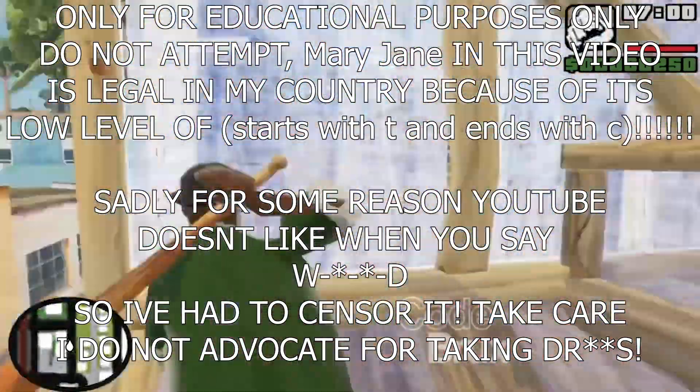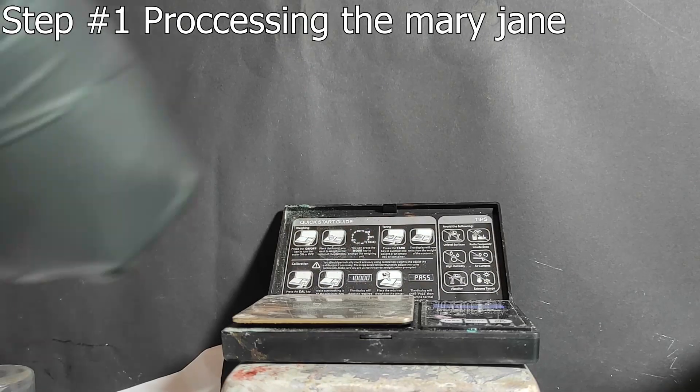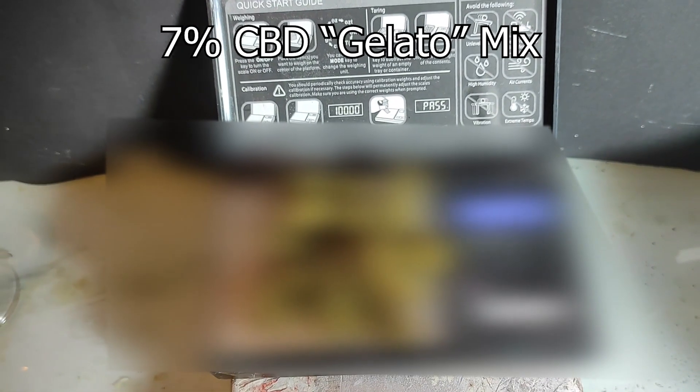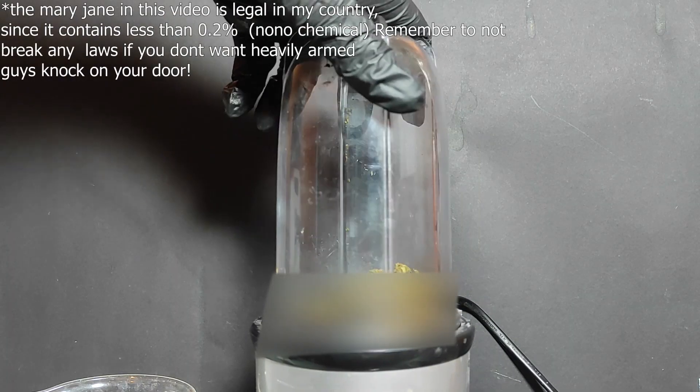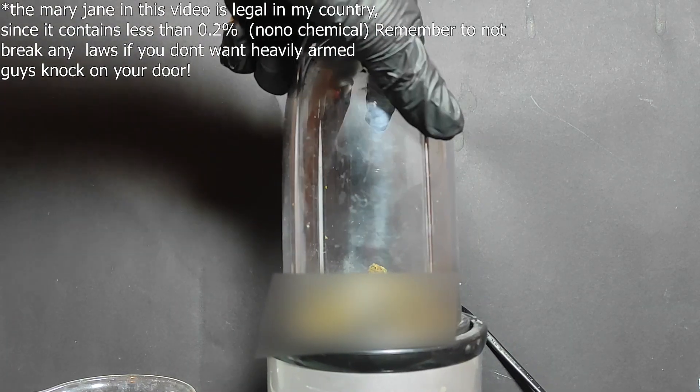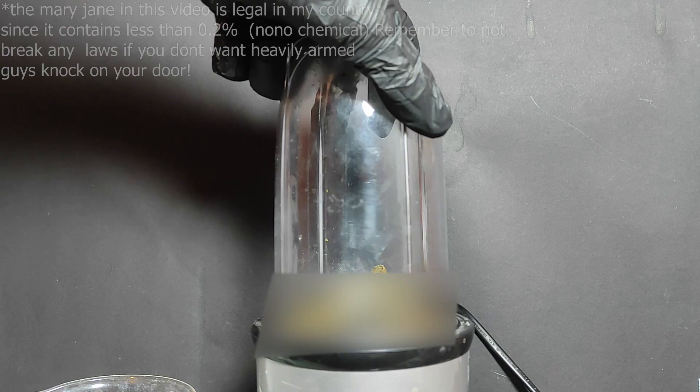This video has been done for educational purposes only. So here we have 5 grams of 7% CBD Gelato Mix M***** and to start I've decided to grind the w** in a coffee grinder. This will open up the h** and increase our yield.